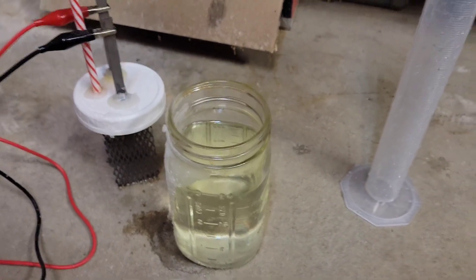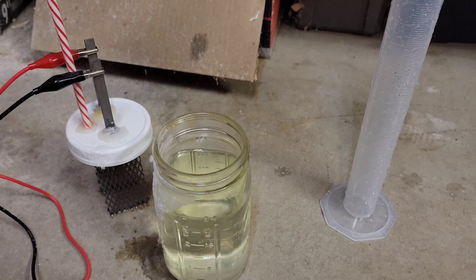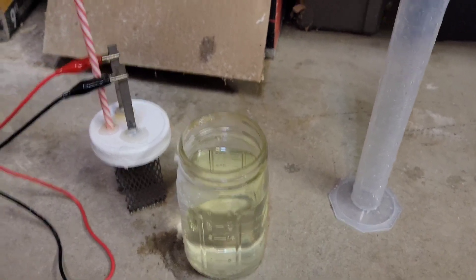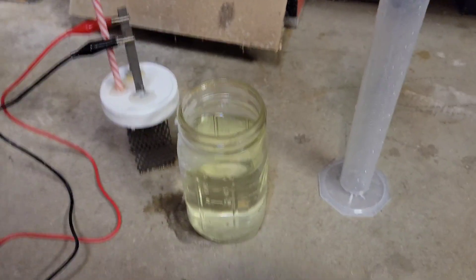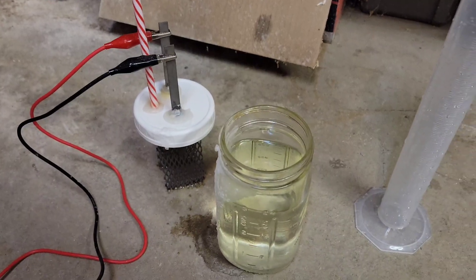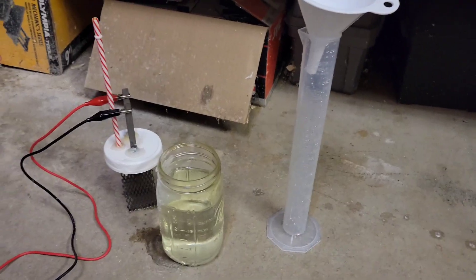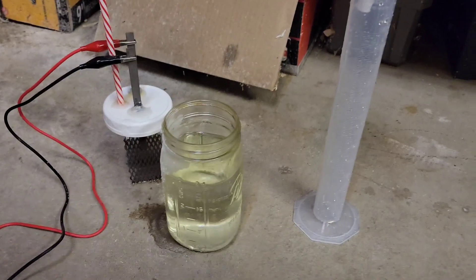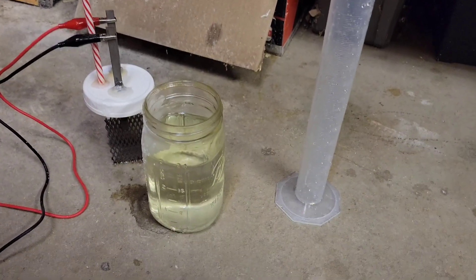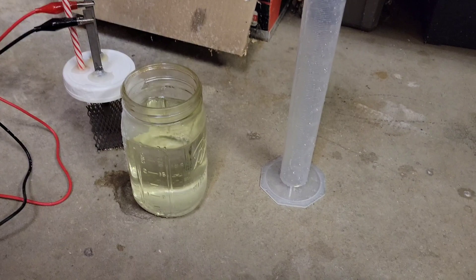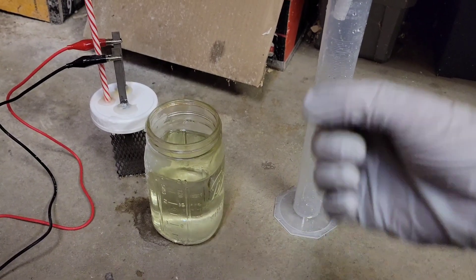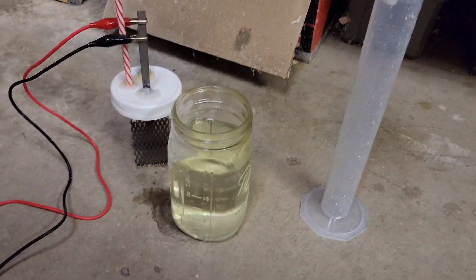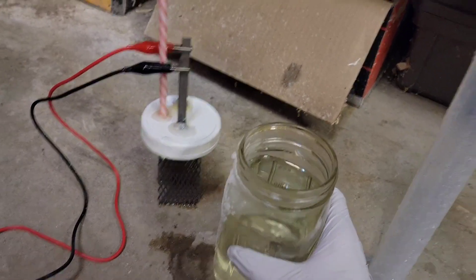So I'm gonna go ahead and show you guys how to be able to check a little bit to know what's inside of your cell. Kind of hard to know exactly what's in it without doing some titrations or something else. Okay, I'm back with my gloves on. Important safety thing, you know, if you mess up one time really bad in chemistry that might be the end of your chemistry hobby or career for the rest of your life. So safety first, got my glasses on, got my gloves, all that jazz.